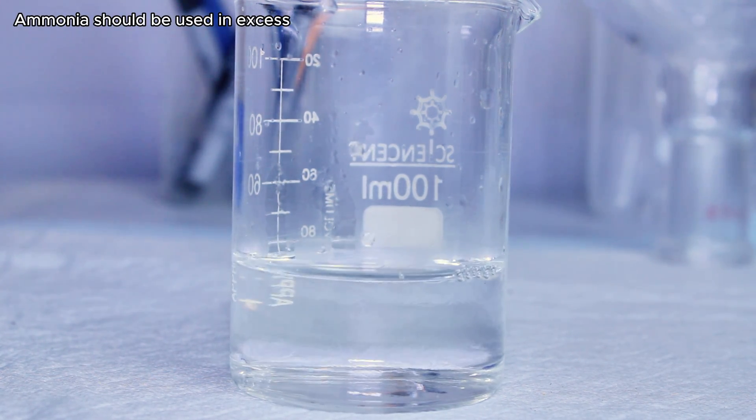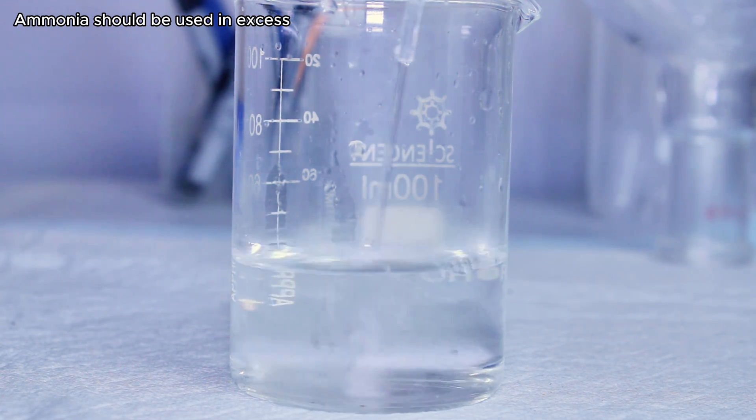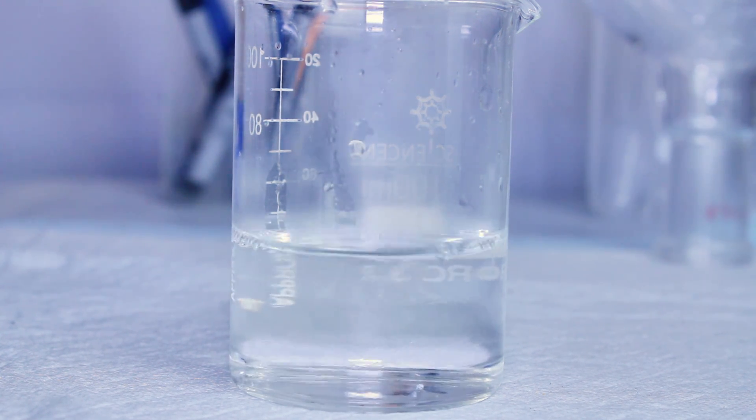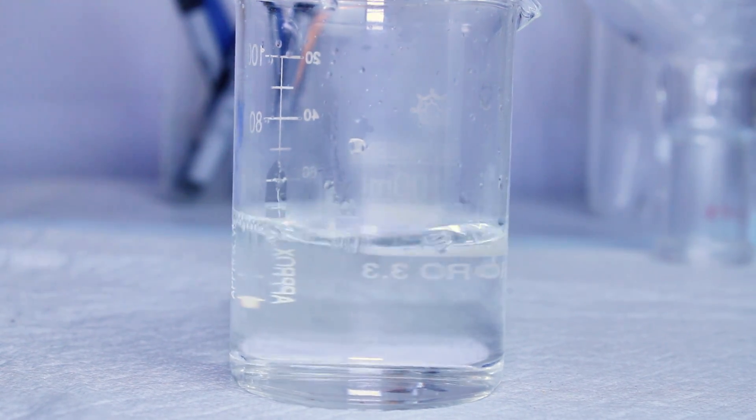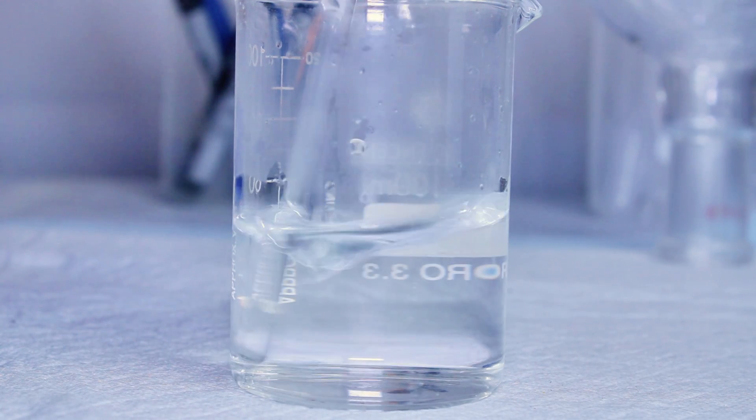Now I didn't actually measure the volume of ammonia I added, because I made this ammonia myself and I haven't titrated it yet to figure out how strong it is. With that in mind, the way that I determined that my ammonia was in excess was to just keep adding it until I could smell the ammonia at a distance without having to waft it or directly smell my beaker.